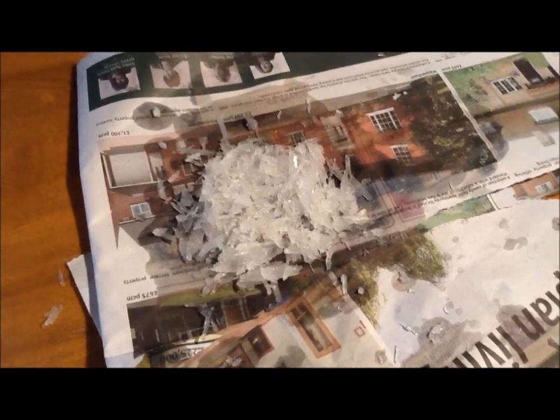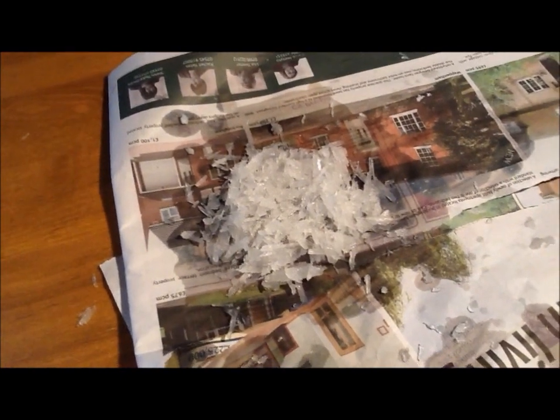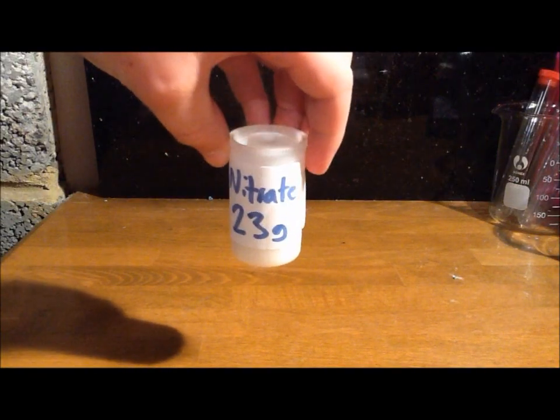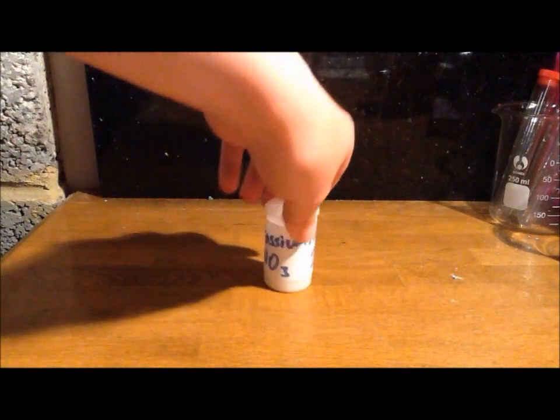There is my product of potassium nitrate. I'm going to leave it to dry thoroughly throughout the day, and then I'll show it to you when I've dried and crushed the crystals. They are 23 grams of pretty pure potassium nitrate. This is a pretty good yield because the theoretical yield was 39 grams, but 13 grams of it would dissolve in the water and wouldn't re-crystallise out, so 26 grams was the maximum. That gives a theoretical yield of about 90%.